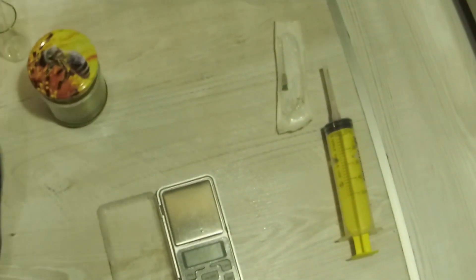Welcome back to Shroom Academy channel. Today we will be showing you how to create liquid culture or liquid mycelium by following simple steps. So let's get to it!